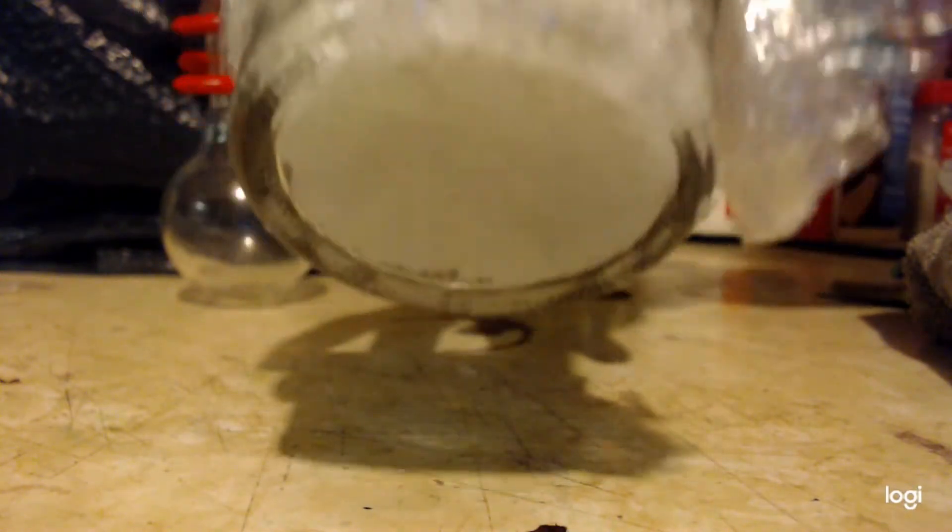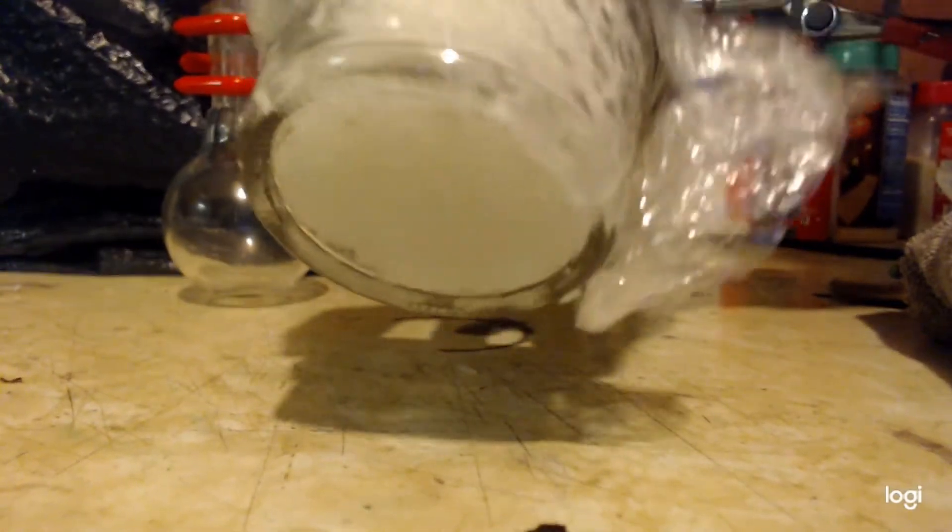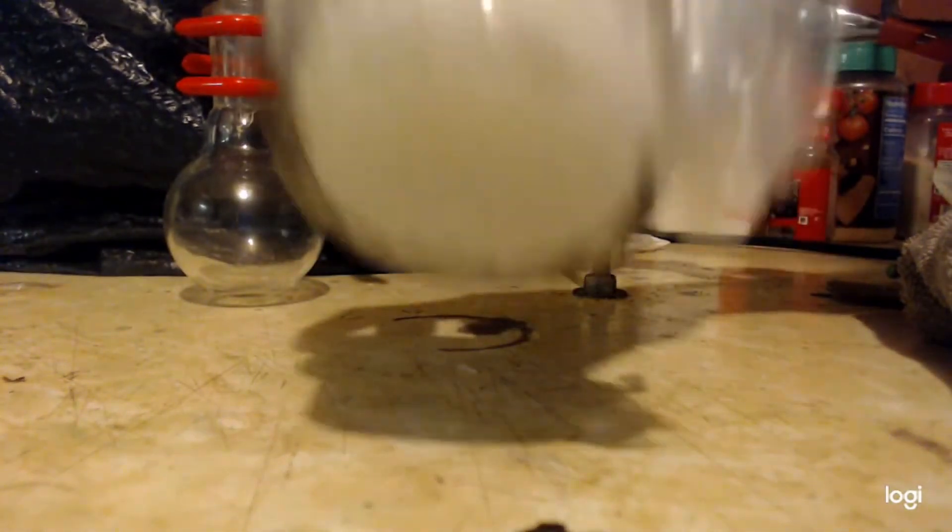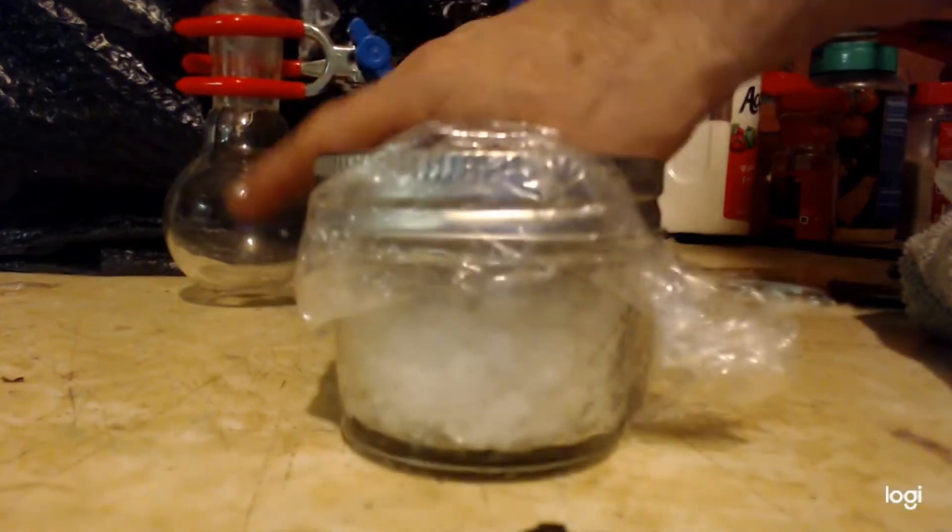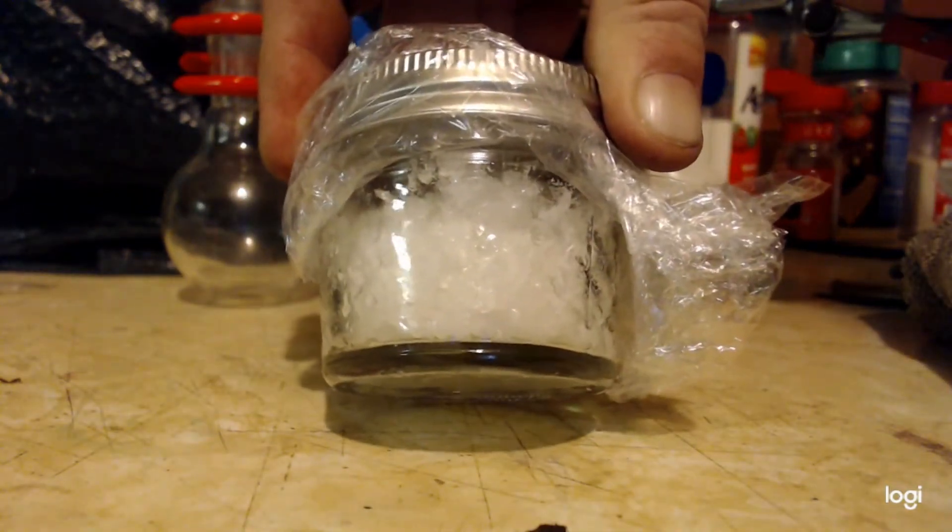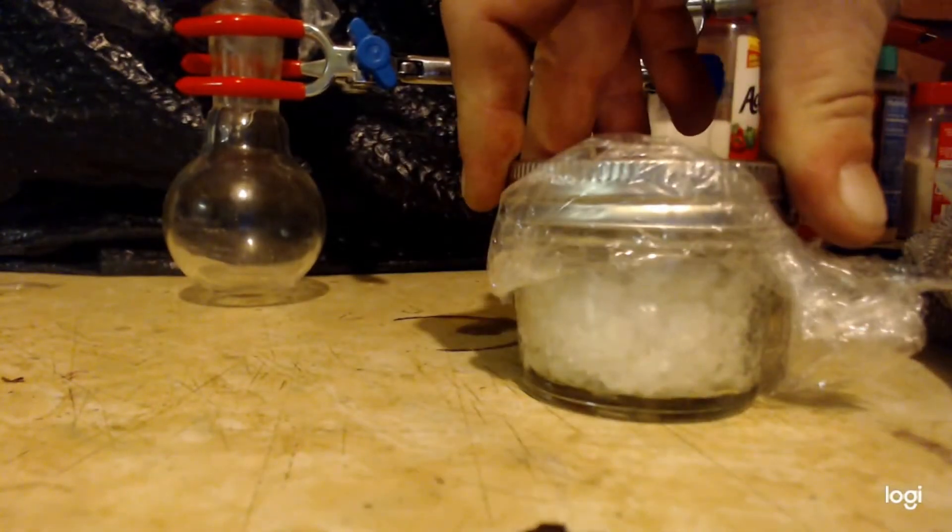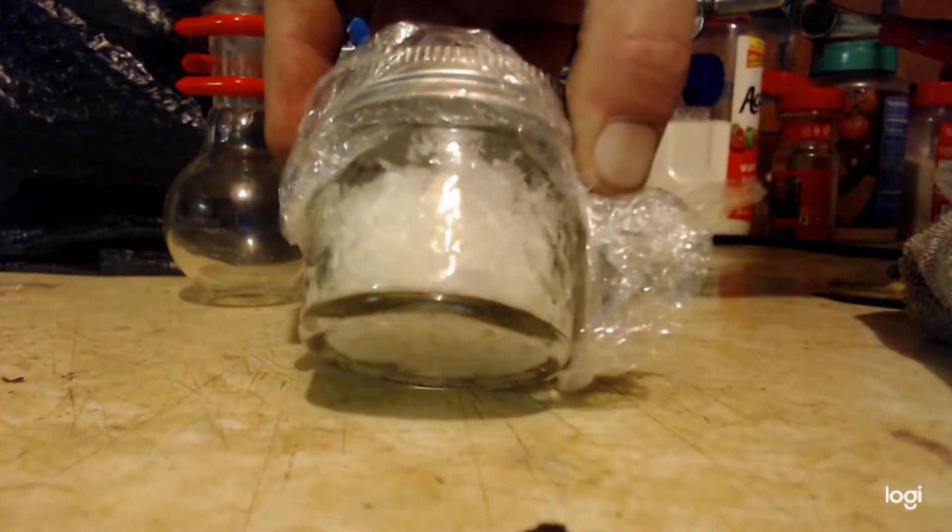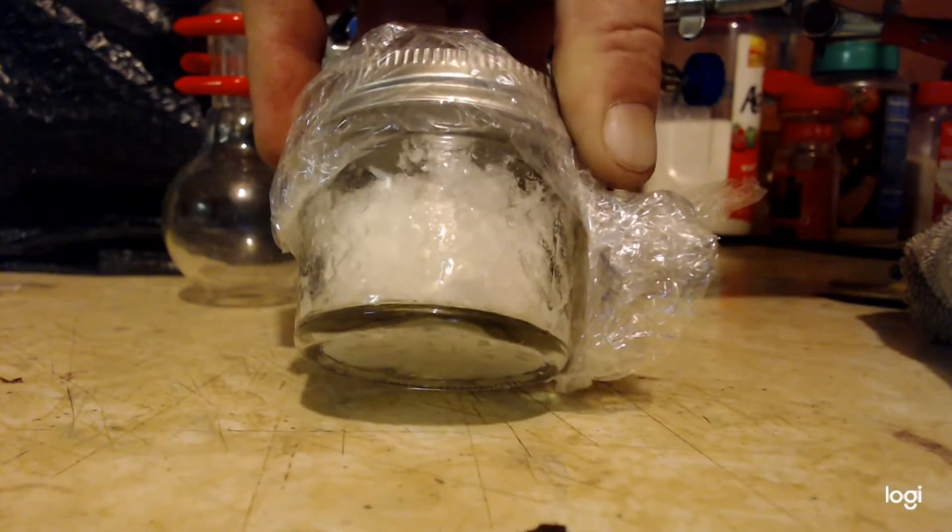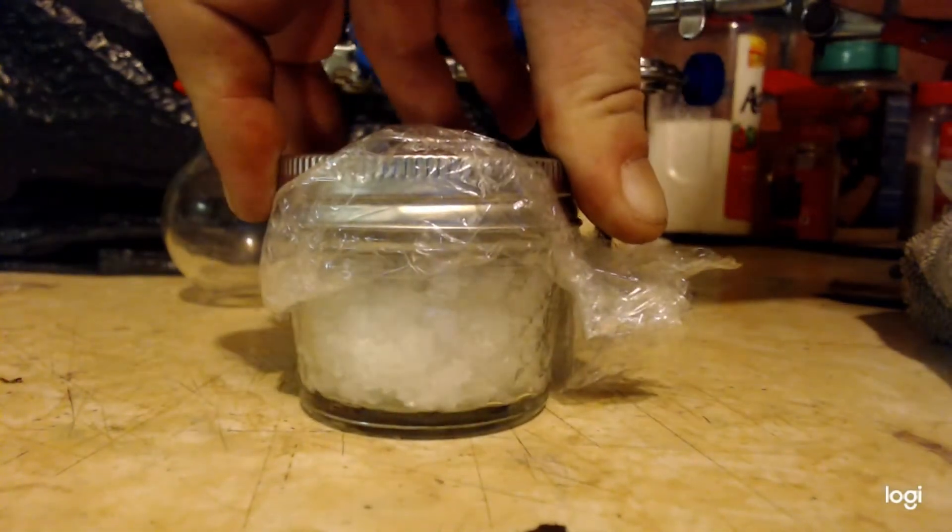I'd rather it be wet with ethanol than water. If you want to get the ethanol off, you can put this in a round bottom flask, place it in hot water, and apply vacuum until it removes all the ethanol. I don't really care though - I've done so much already. I got a decent yield, more than I expected, and this is only the first batch.